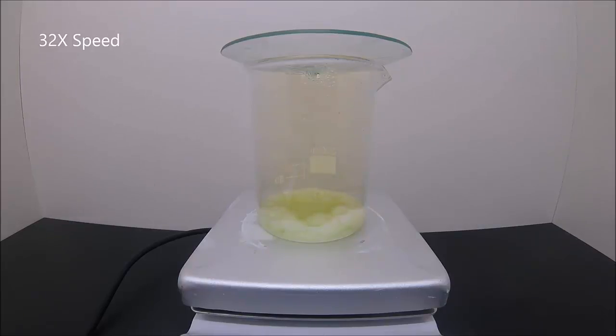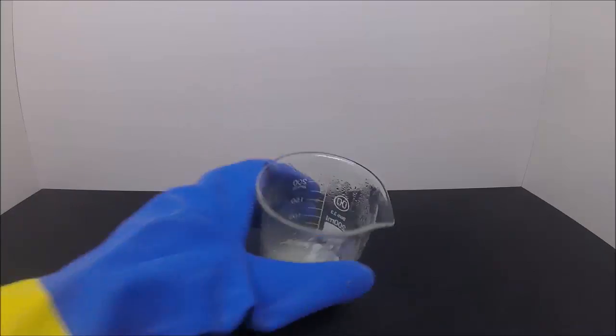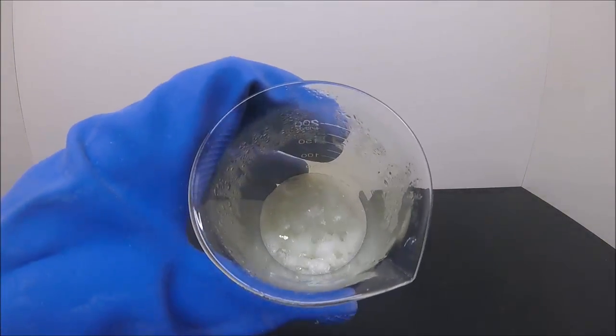For obvious reasons, this step must be done inside of a fume hood. As the reaction dies down, we can already see some crystals precipitate out of the solution. And here is the beautiful white crystal of silver nitrate.